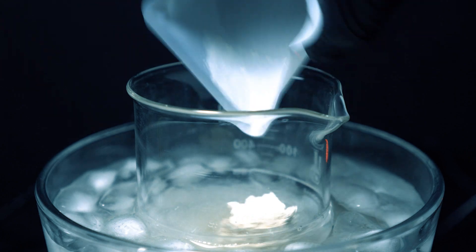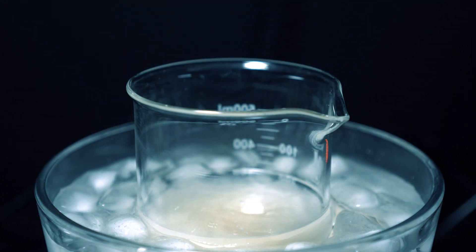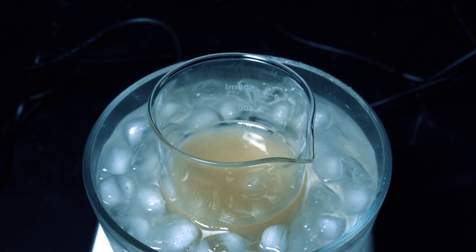Piperine is easily dissolvable in acetone, and it shouldn't take too long to dissolve all of it. However, we are in an ice bath, so it might take a little bit longer, as lower temperatures decrease solubility. Of course, the solution is yellow, so now we got that yellow chemistry going again. We just have to wait until this is fully clear.